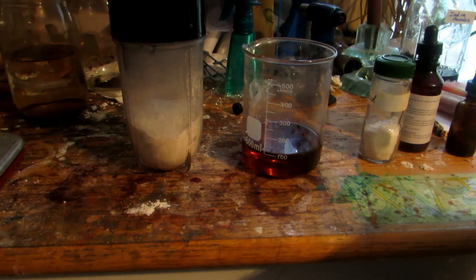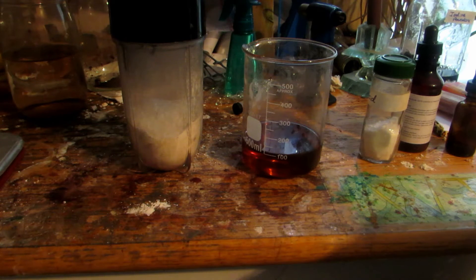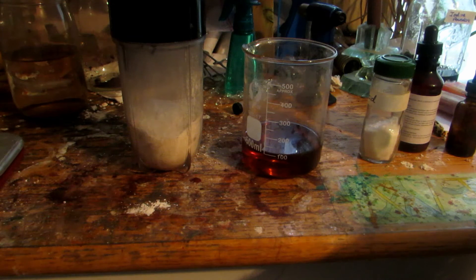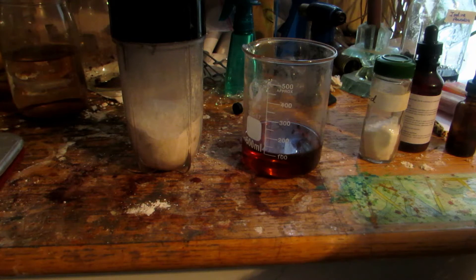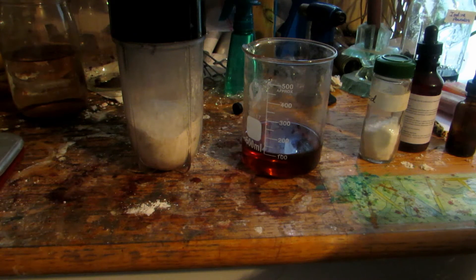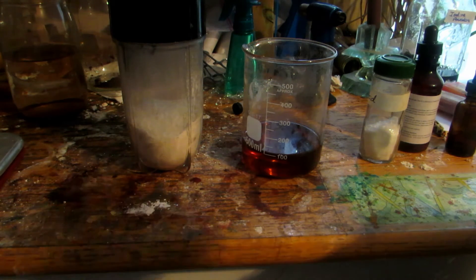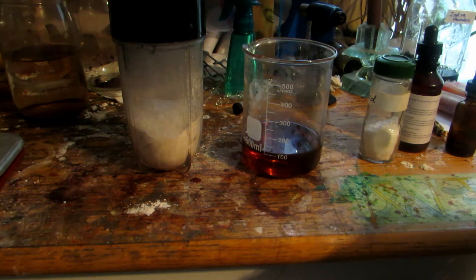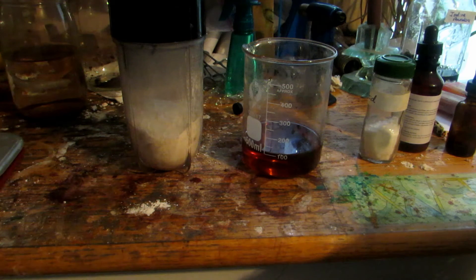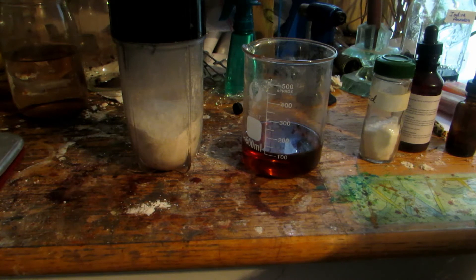Hey guys and welcome back to another video. In a previous video which I did a while back, I actually made azeotropic nitric acid by using ammonium nitrate and sulfuric acid drain cleaner and some water and we distilled that off and it was about 68% pure nitric acid.